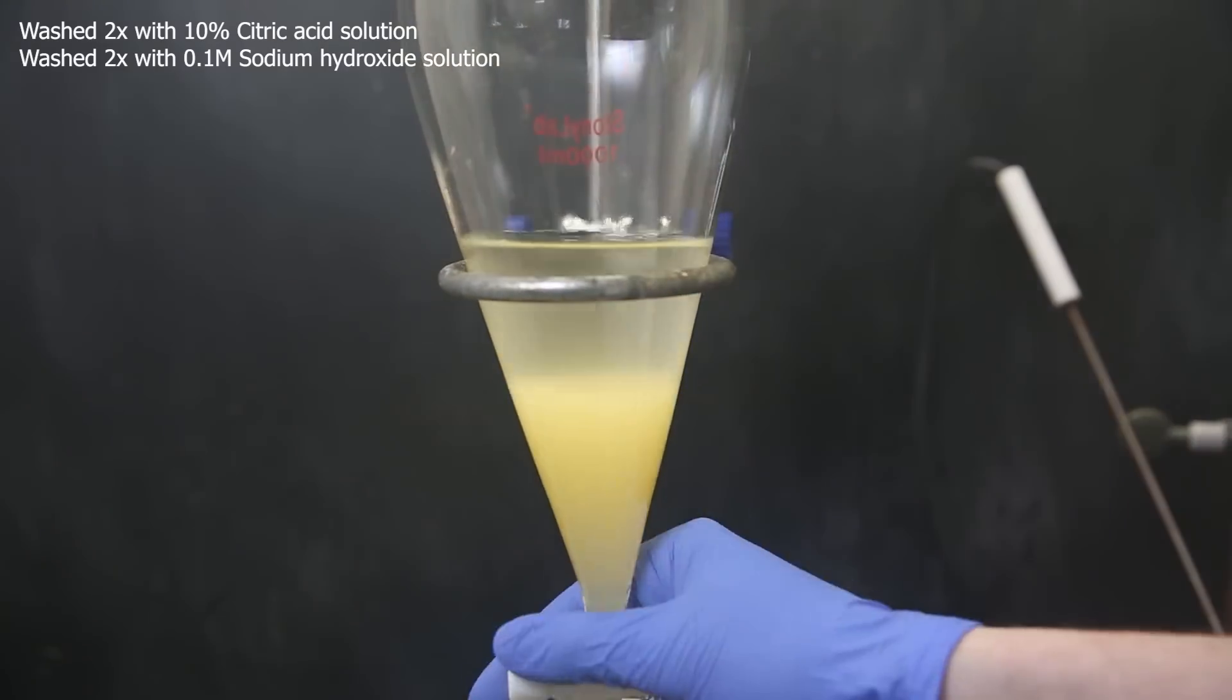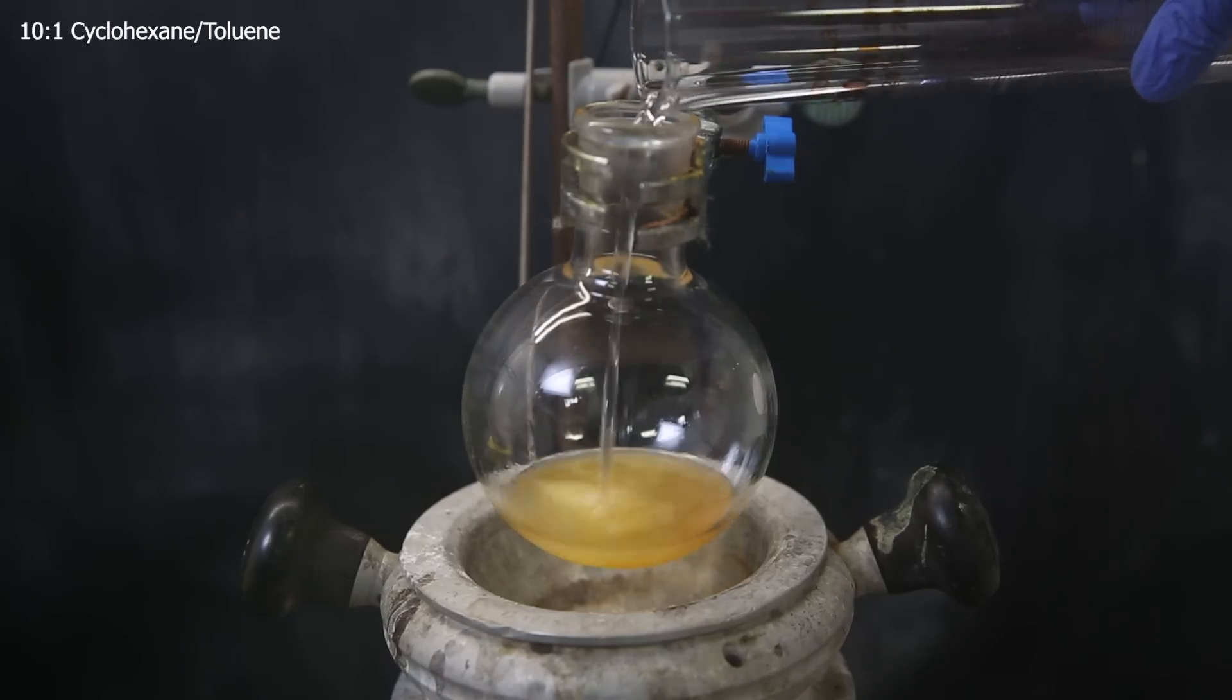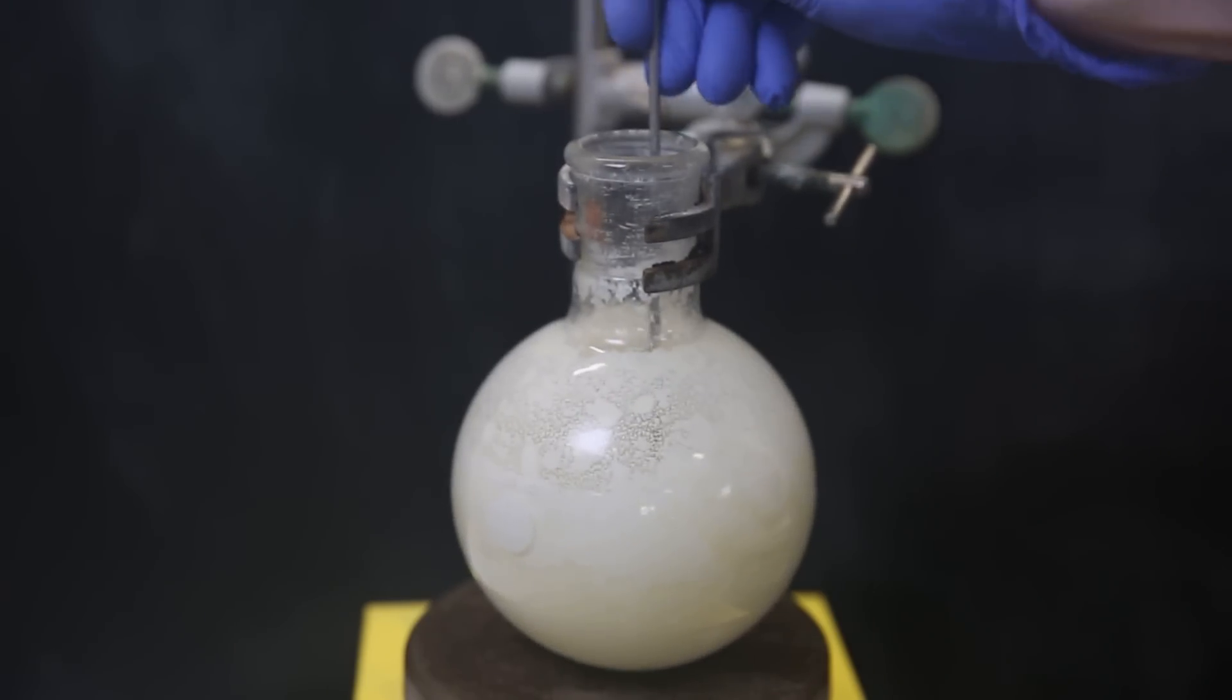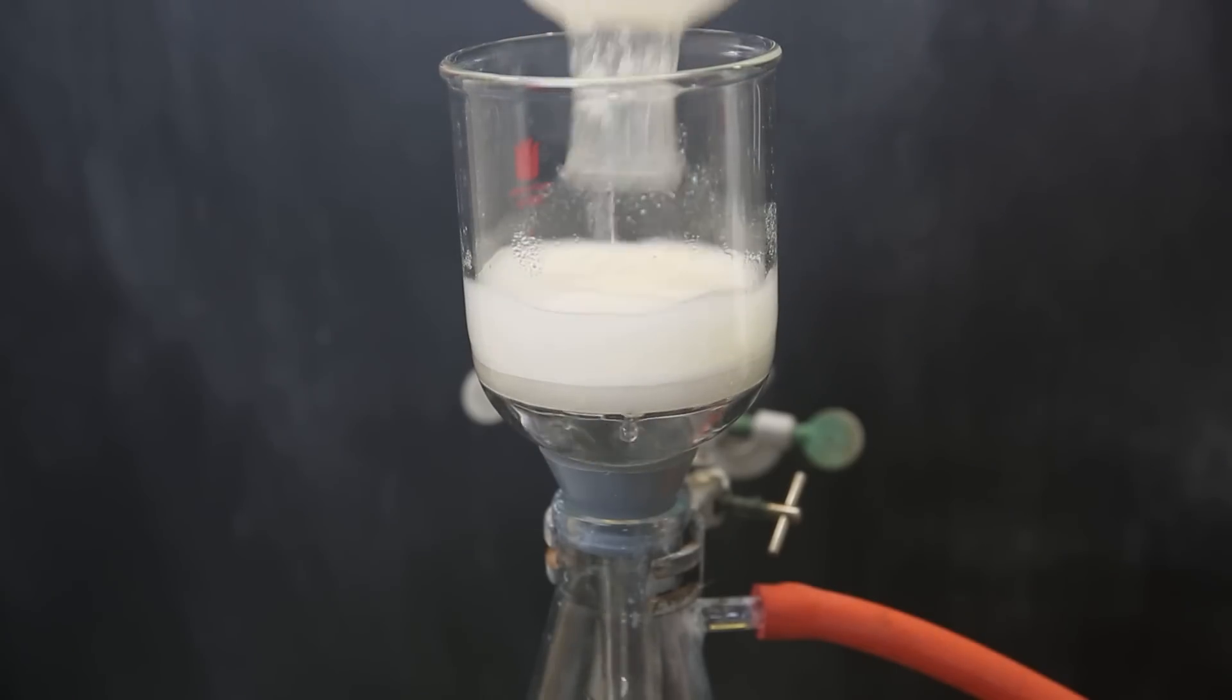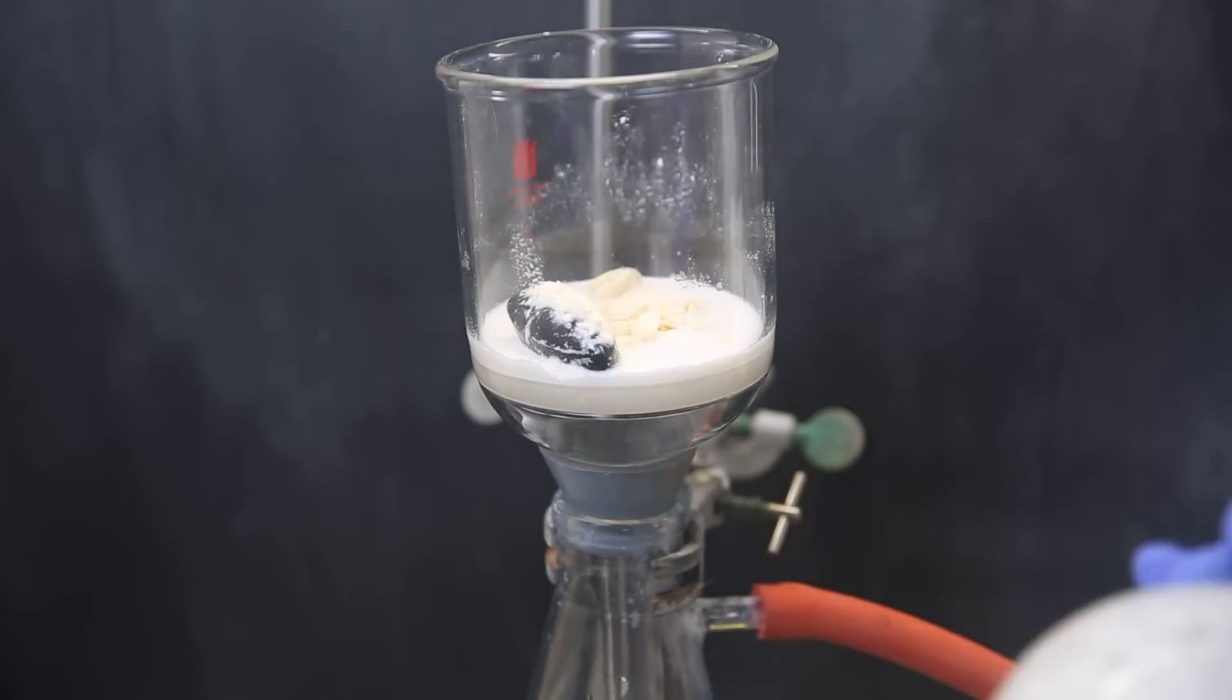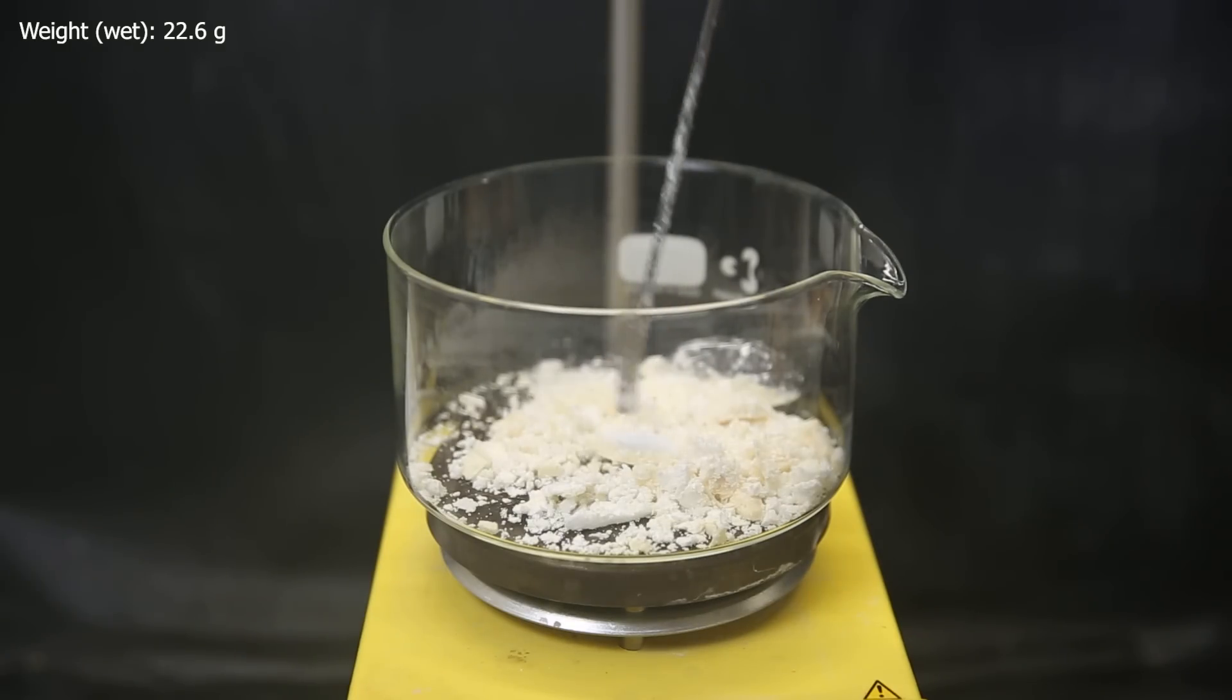So I take the washed dichloromethane layer and distill off all of the solvent, leaving behind an orange-ish liquid. To force it to solidify, I add some 10 to 1 cyclohexane toluene mixture and shake it strongly. After leaving it to stir overnight, all of the oil splashed on the walls and luckily solidified to become an off-white solid. To collect it, I set it up for vacuum filtration, but a lot of it is stuck to the flask, so I have to scrape it off and wash it out with more of the solvent mixture. I then move it all to this dish and the weight is 22.6 grams, but it is not pure yet, so I will have to do a few more things to make it suitable for consumption.